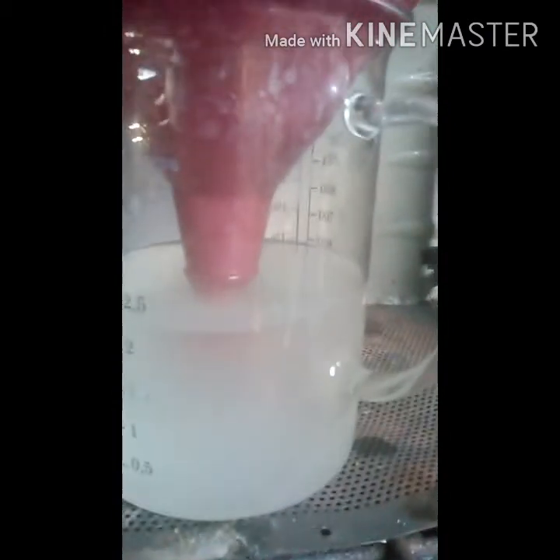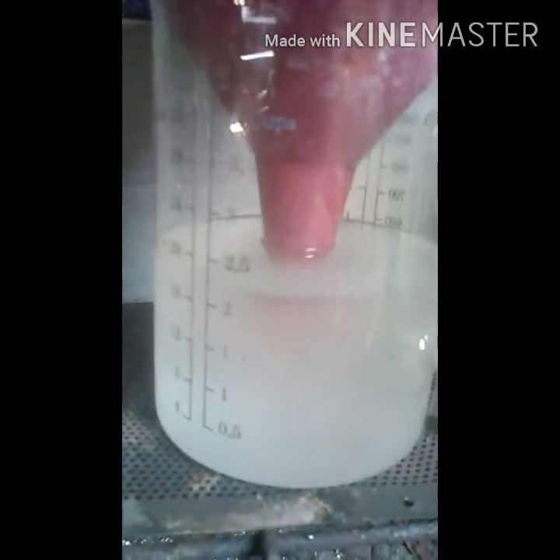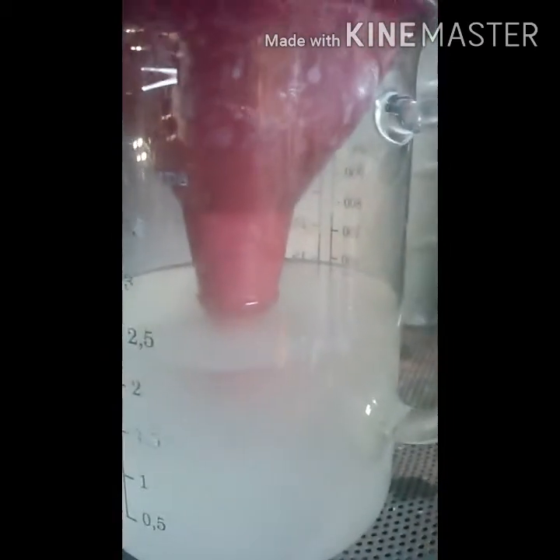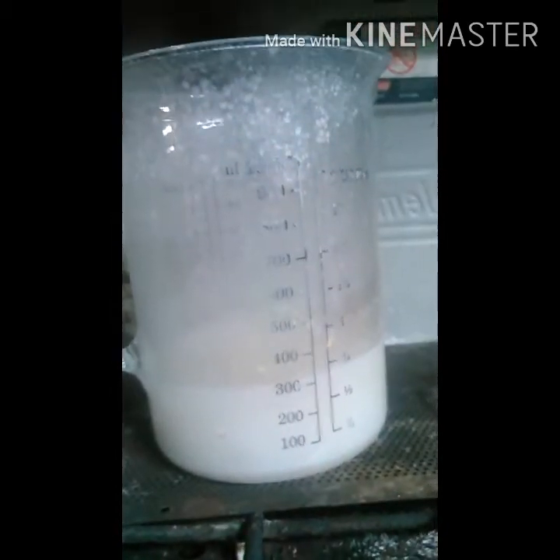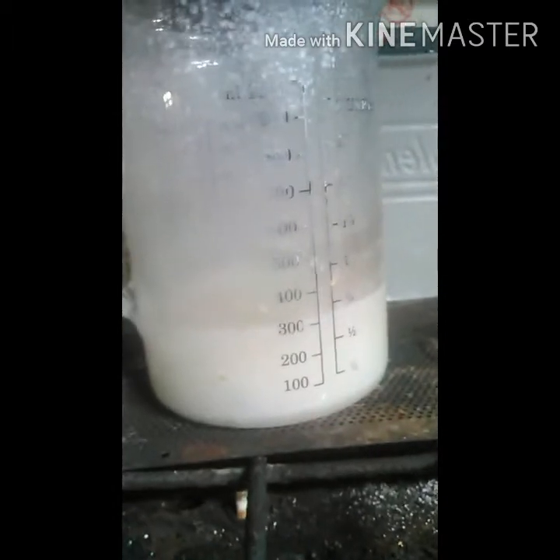I'm just about done filtering. Next I'm going to put it on some heat and boil it down until crystals start to form, then take it off the heat as soon as I see one form. I boiled it down to there and let it cool, and as you can see it basically filled up everything with crystals.